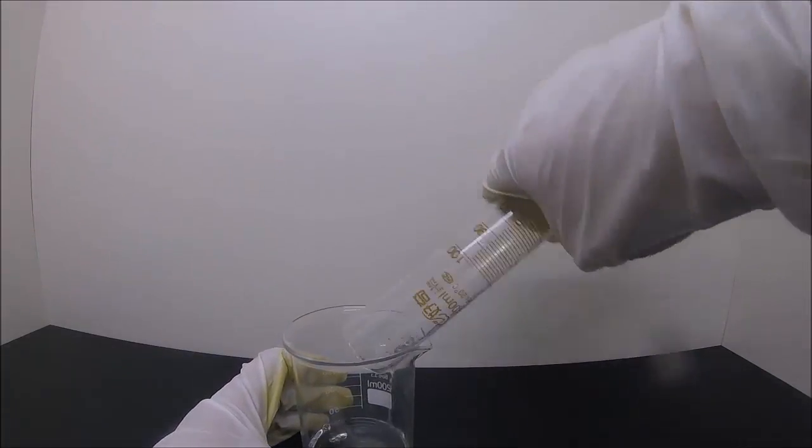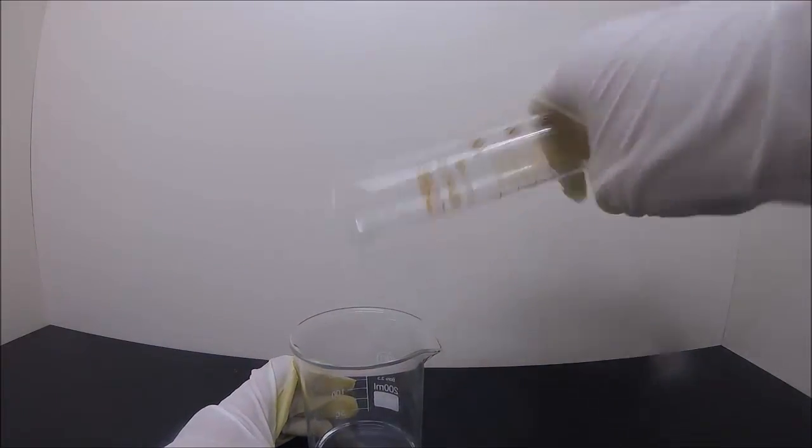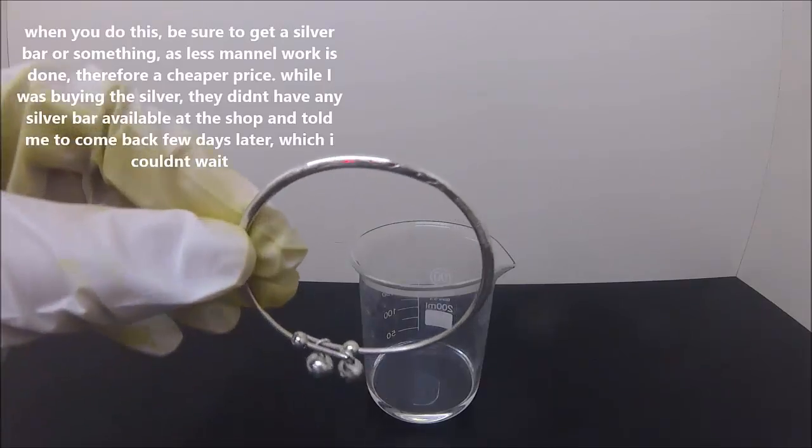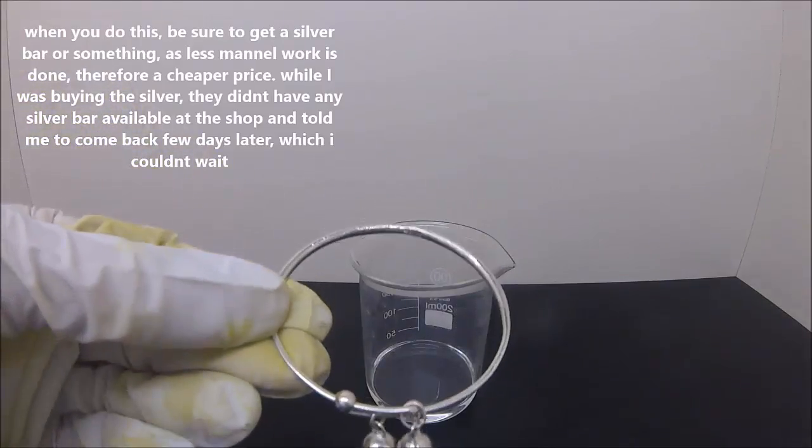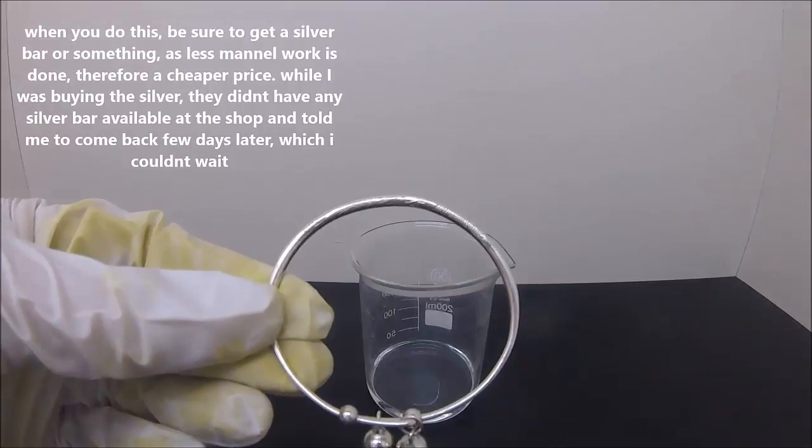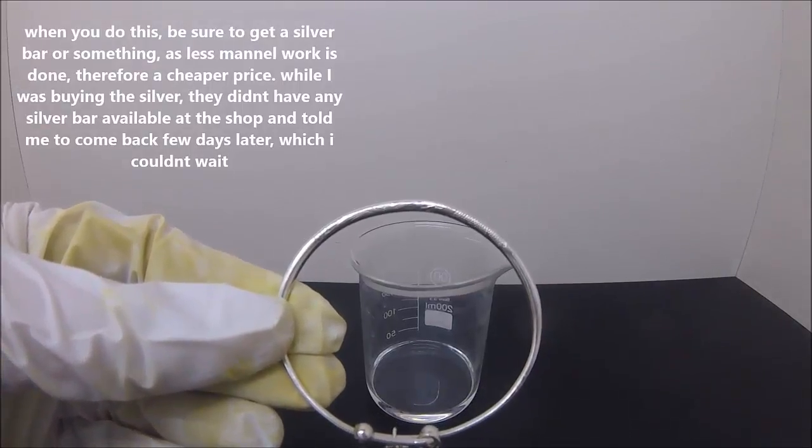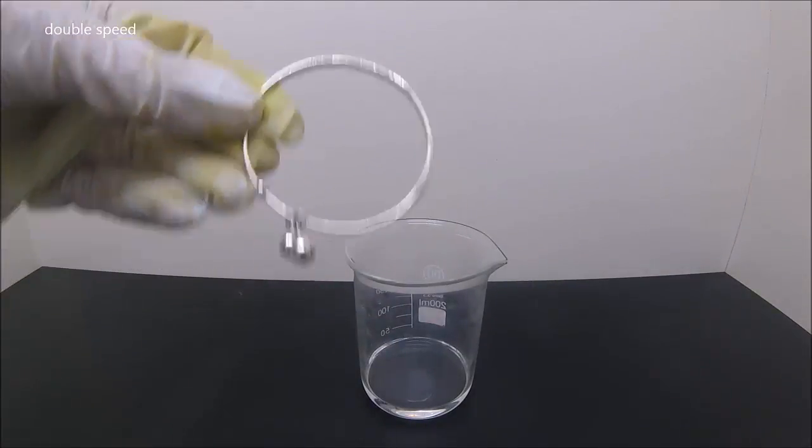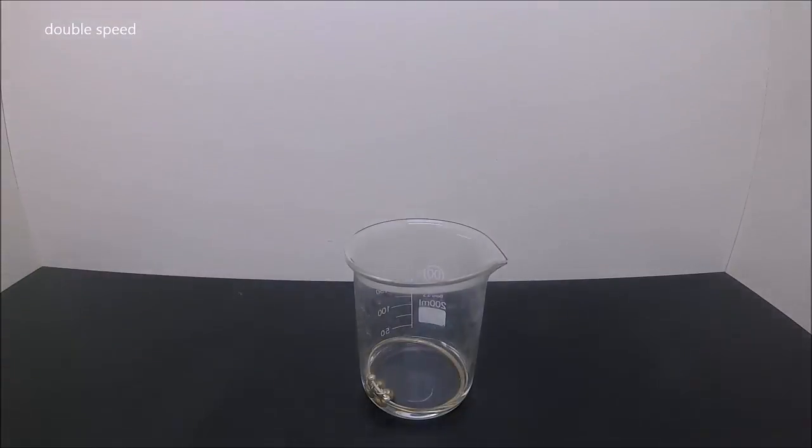Then get a beaker and pour in the acid that we prepared earlier. And here is the silver. It's a bit of a shame to destroy a piece of work like this, but some sacrifices have to be made for the sake of science. The silver is placed into the beaker and submerged in the acid.